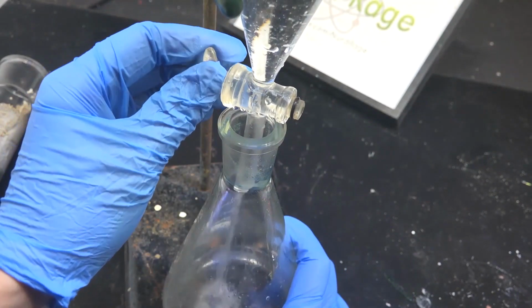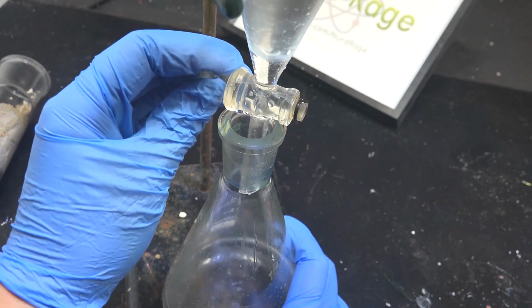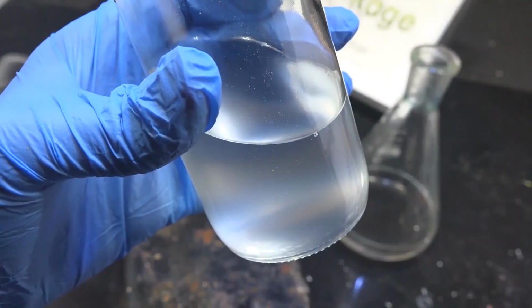Now you might be wondering why I'm washing with water when I said water destroys ethyl propionate. While the mixture is cold, the reaction of water and ethyl propionate is very slow. And there it is, crude ethyl propionate.